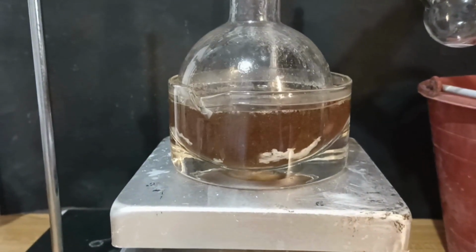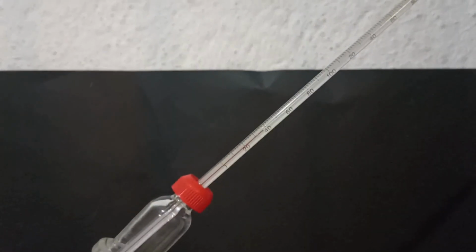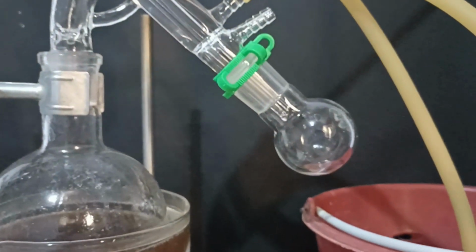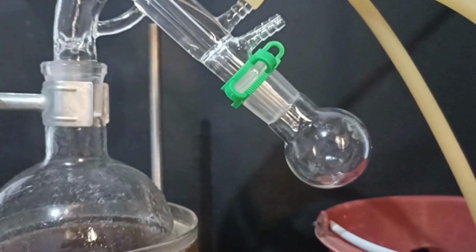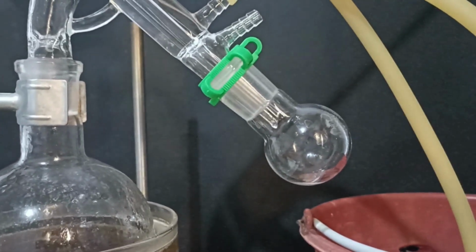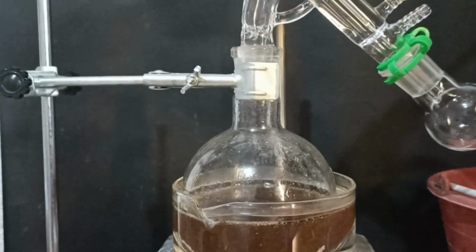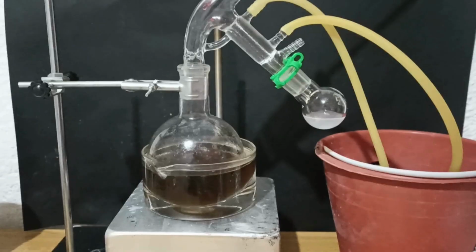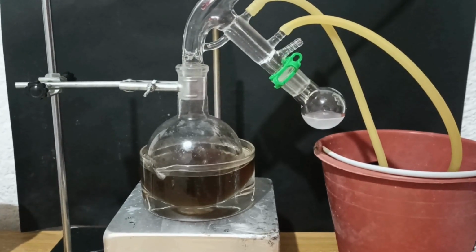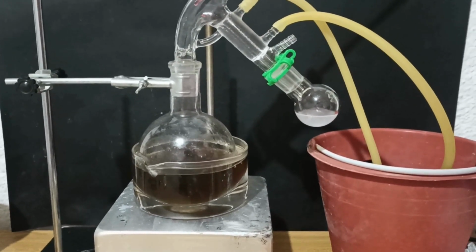The layers were separated again, and 200 milliliters of glycerin, 35 milliliters of water, and 42 grams of sodium hydroxide were added. Warning: it was too much sodium hydroxide. 20 grams would have been perfect. The round bottom flask was set in a glycerin bath in order to reach very high temperatures, speeding the reaction up dramatically.